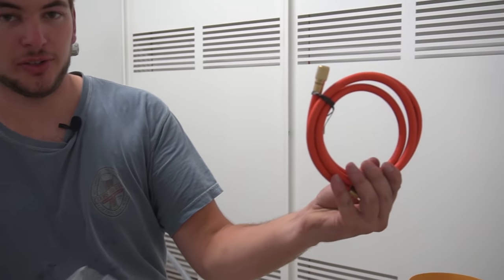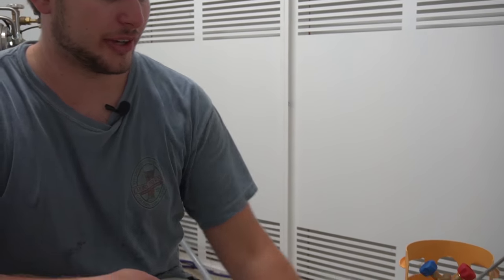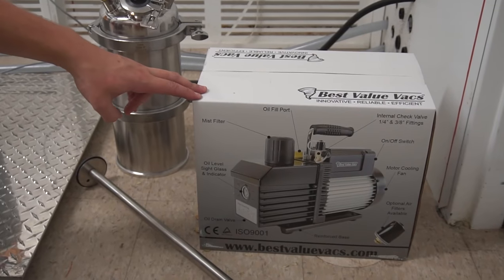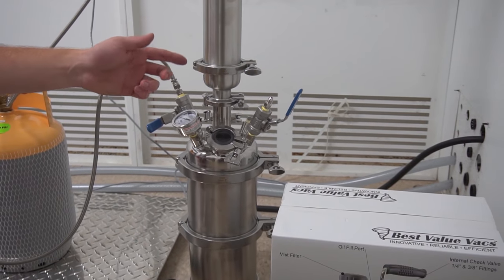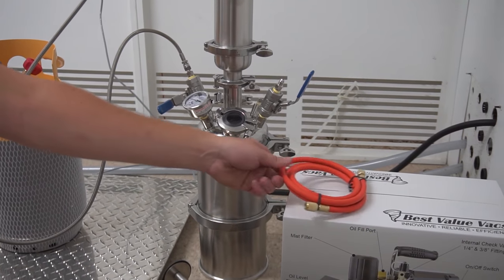And we have an HVAC hose. This is going to go with our vacuum pump over here. We're going to use this to pull a vacuum on the entire extractor after it's packed up with material.